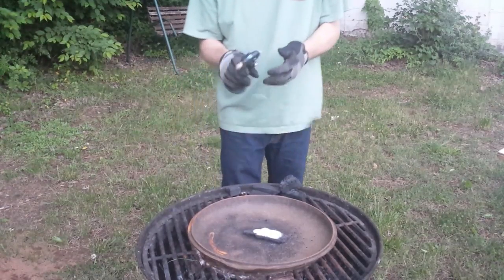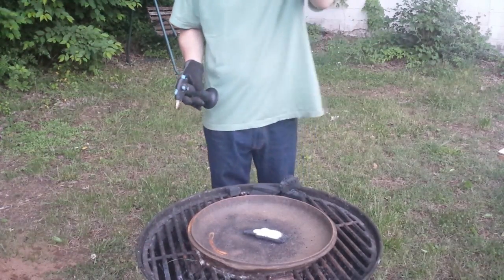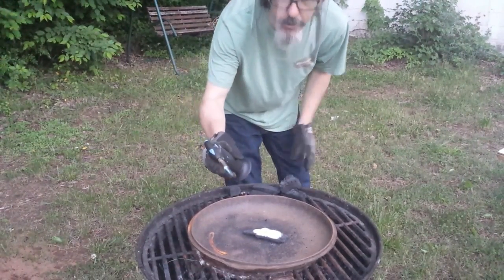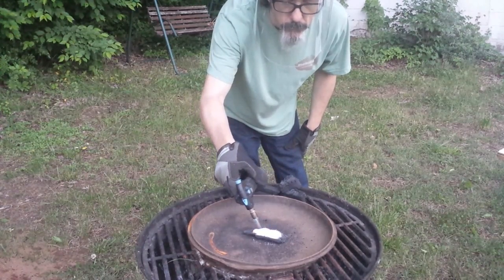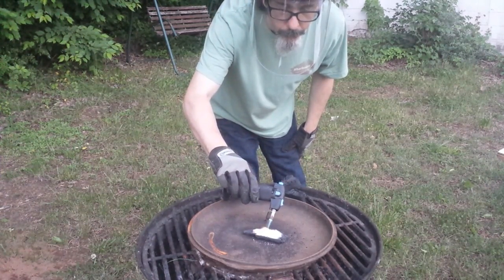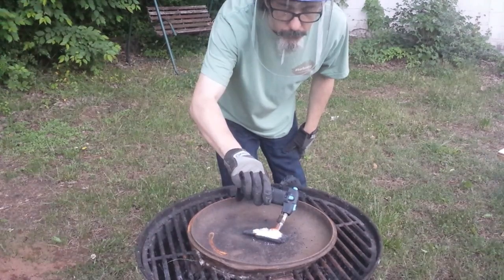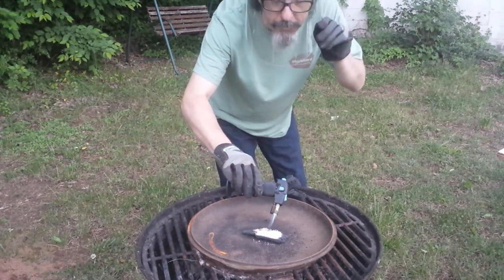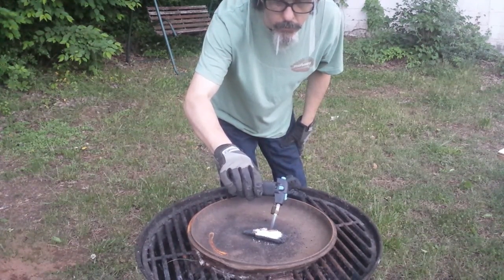I don't really know how crazy this will get, but I did this part of the experiment before — it's pretty impressive. When I add sulfur, I know what's going to happen, so even more safety gear. All right, we're going to try the butane flame to start to melt the potassium nitrate. It should start reacting soon once some of this potassium nitrate gets hot enough — I'm getting a nice little puddle going here.